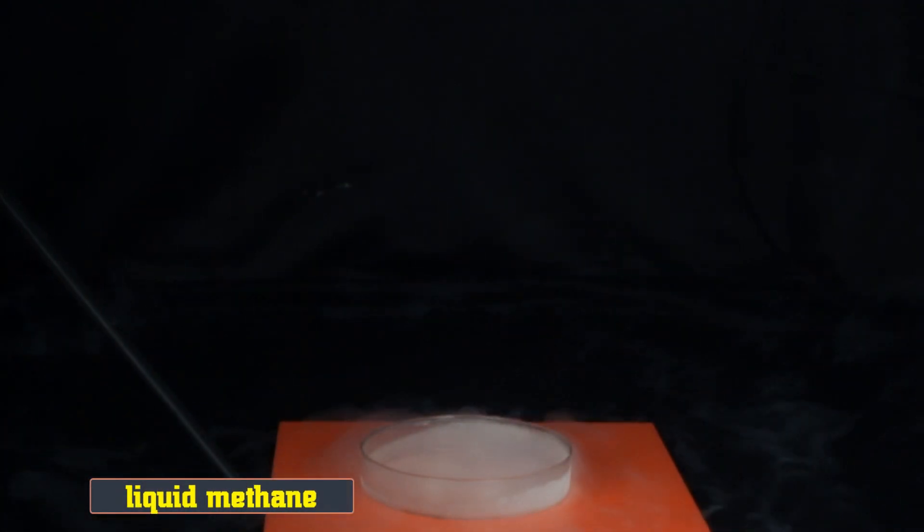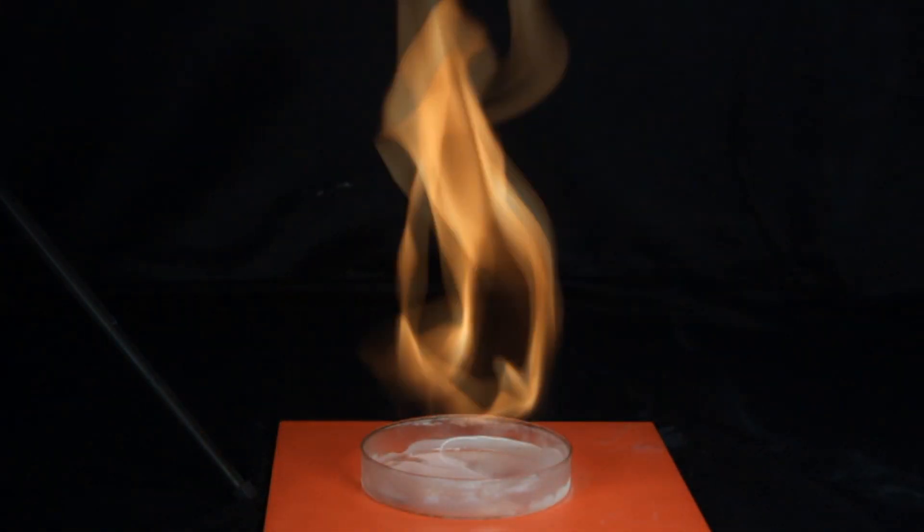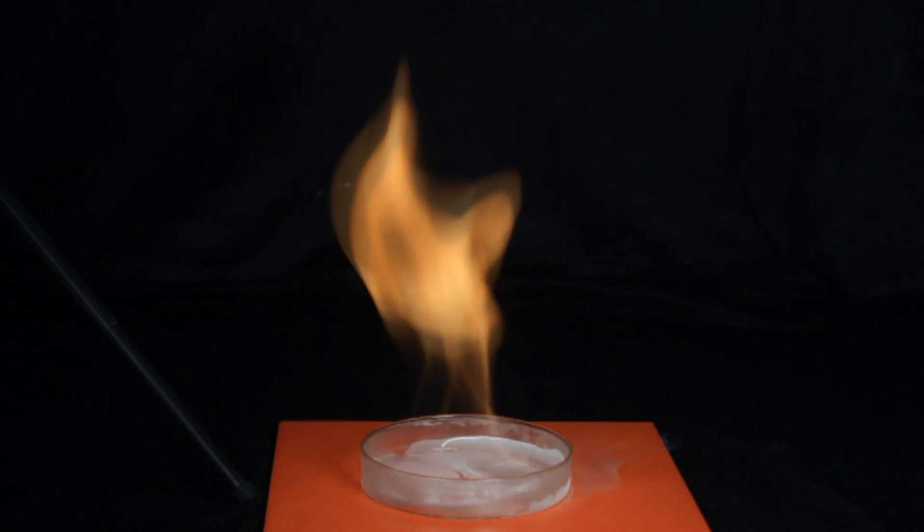Let's compare it with the burning of liquid methane. Now let's look at the reaction — burning of liquid methane with liquid oxygen.